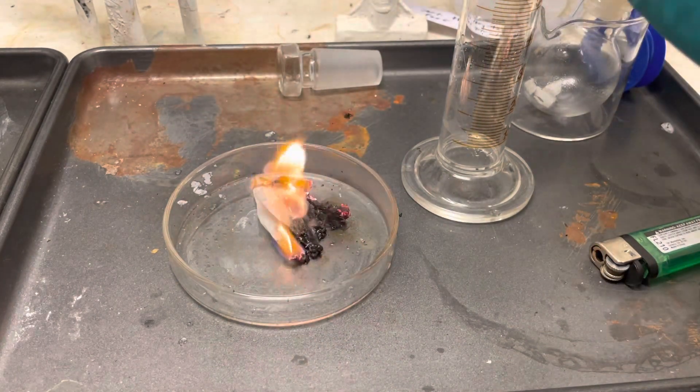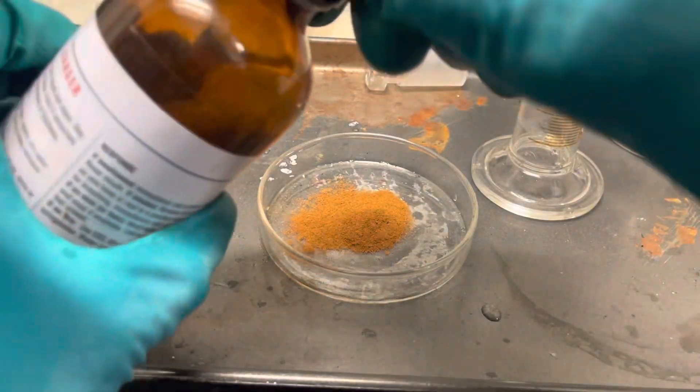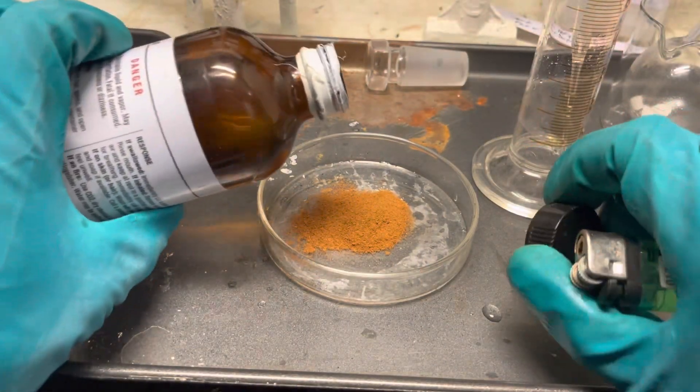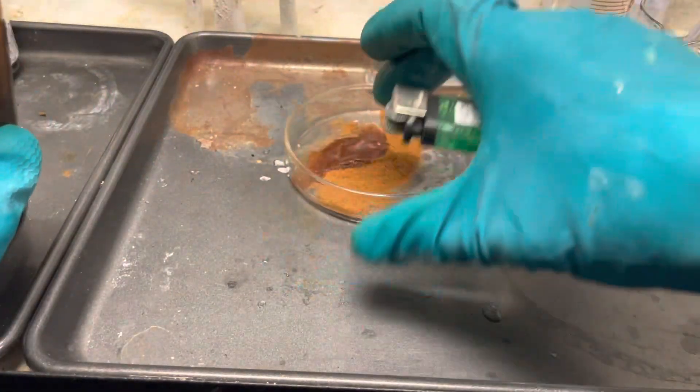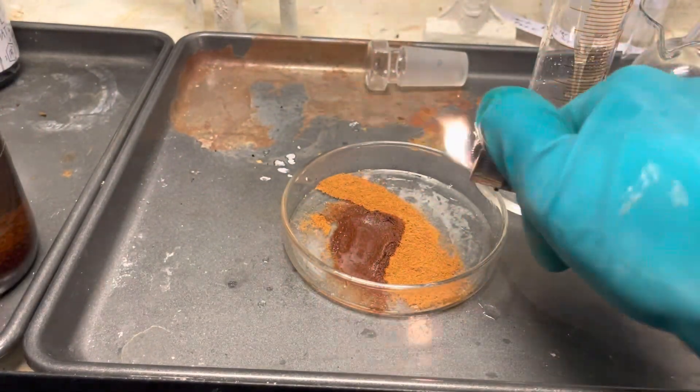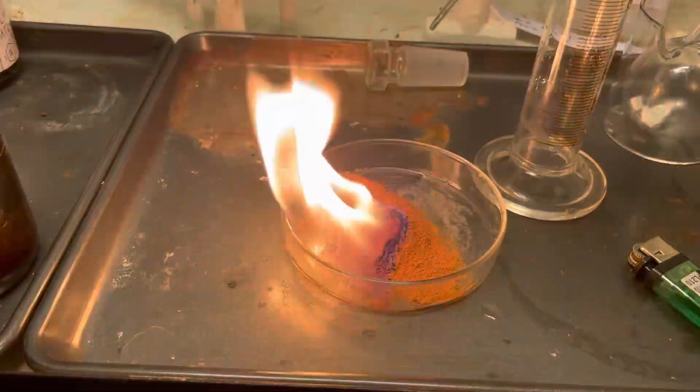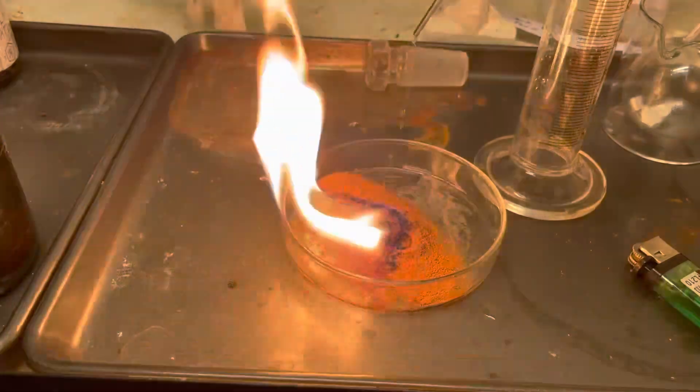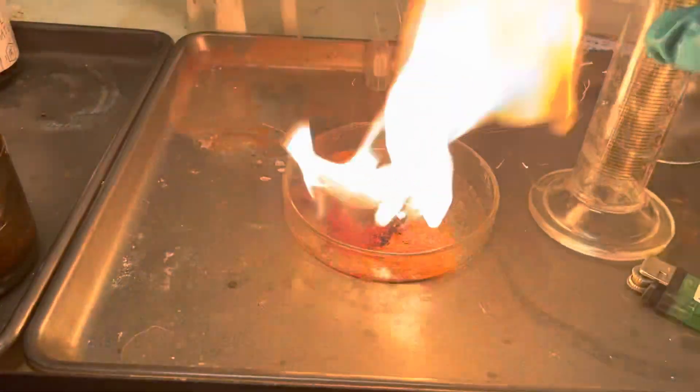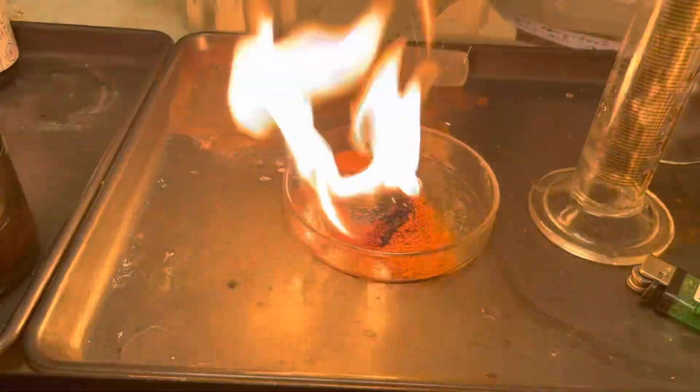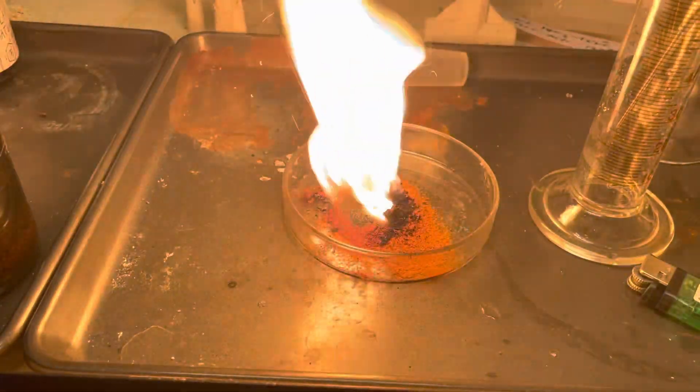Next, you won't guess what it is. Even more wrong. Cinnamon powder. Soaked in heptane because cinnamon powder is not very good at burning. But after adding the perchloric acid, you can see cinnamon powder makes such a good fuel. Who knew that for perchloric acid?